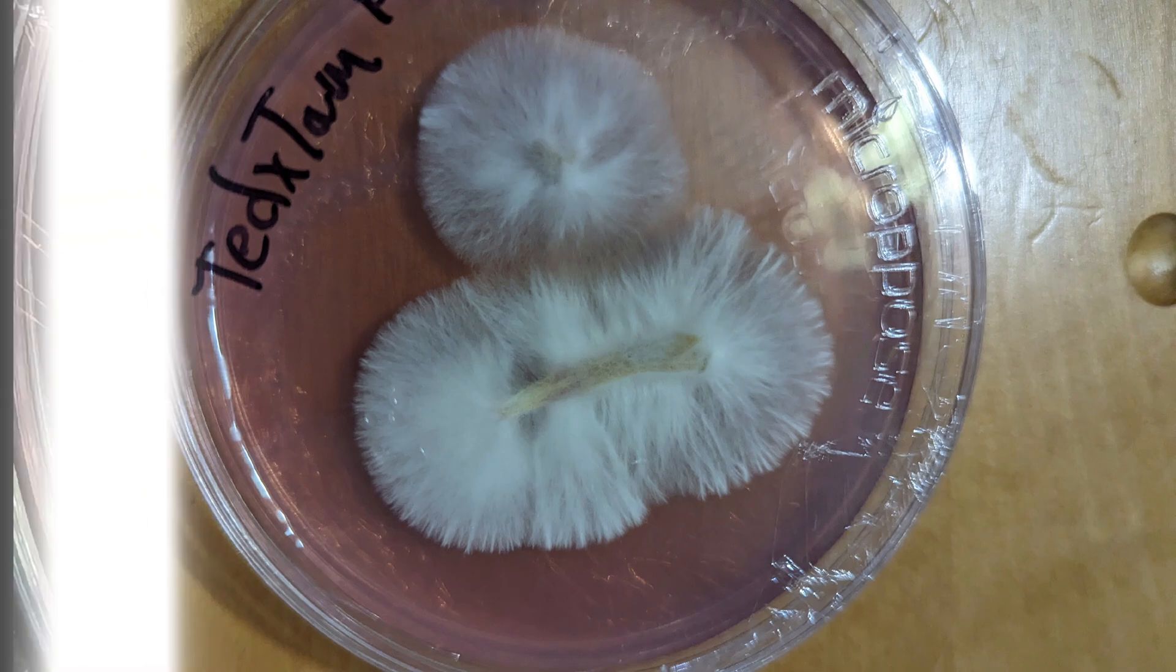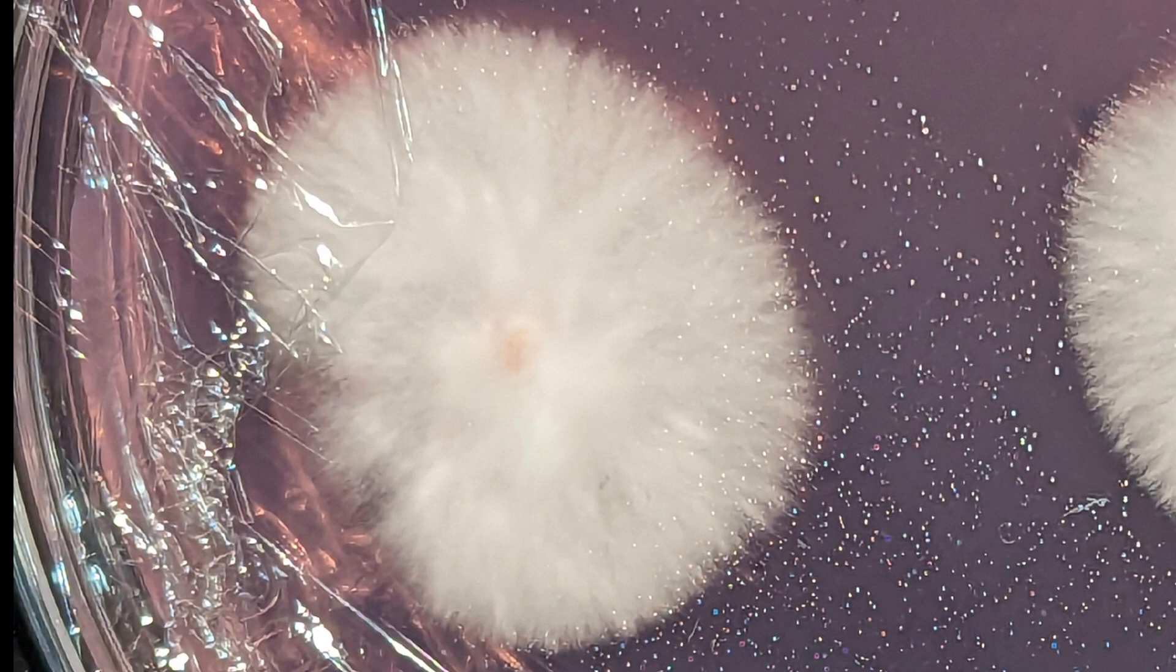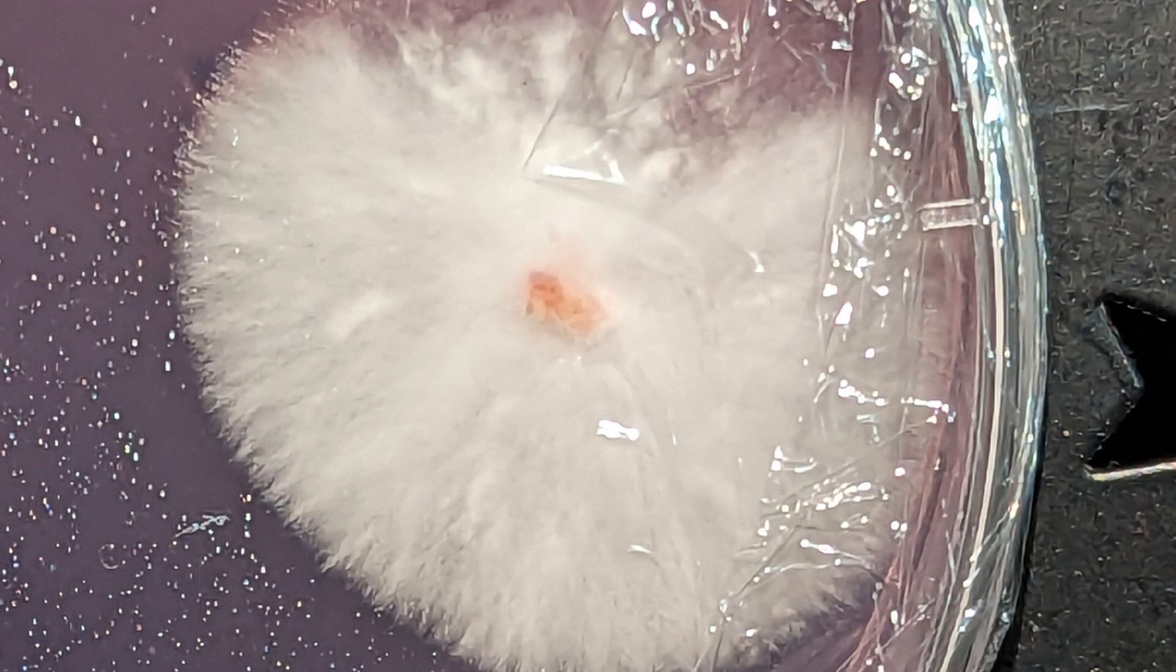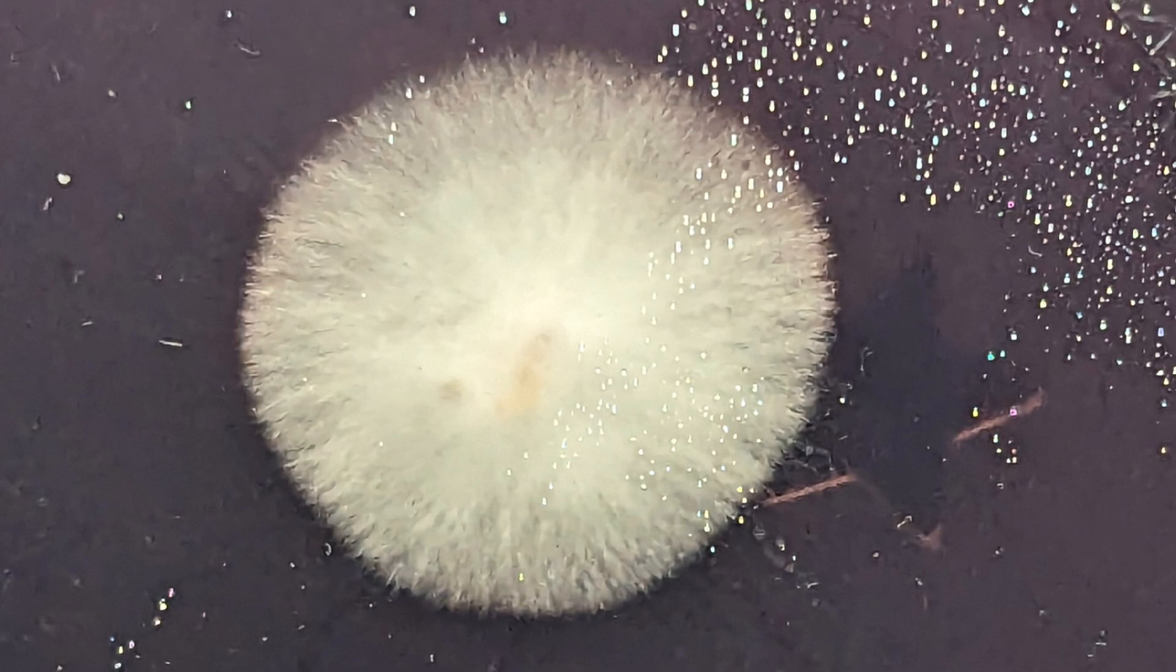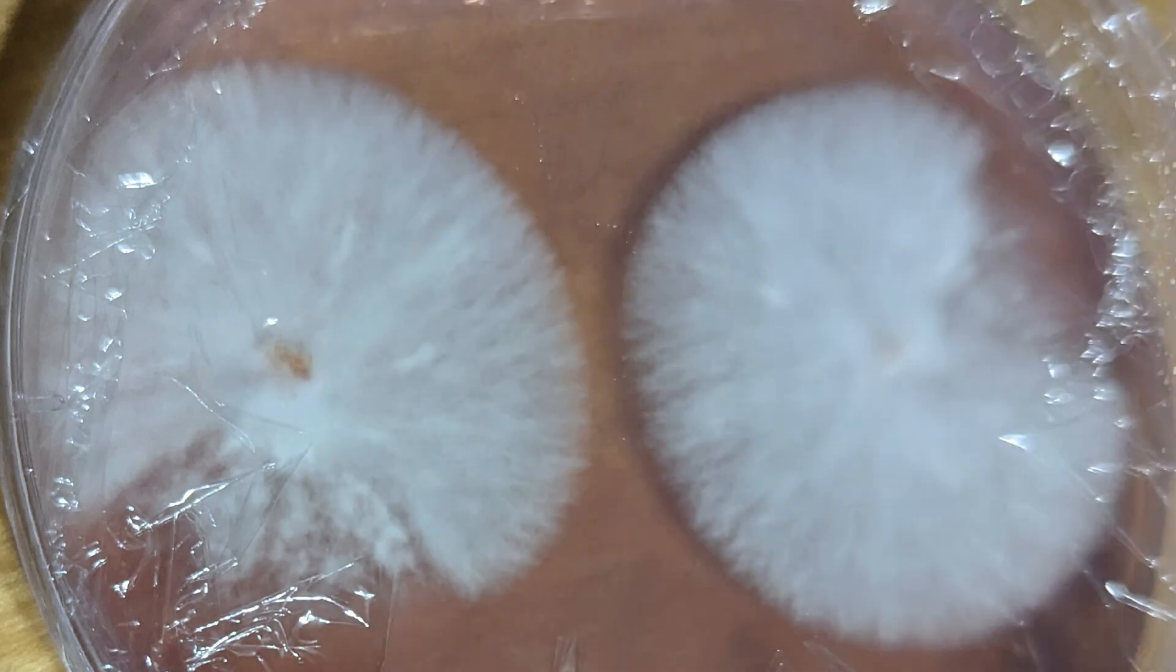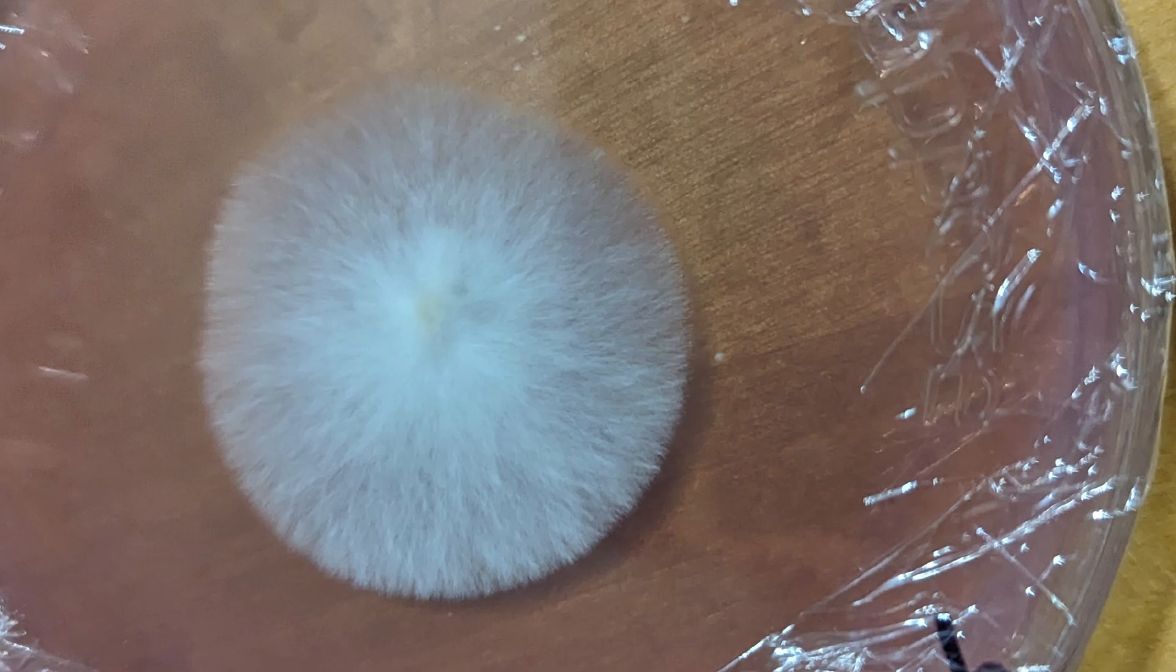These next pictures are the clones from a squat and from the blob in the same tub, and they appear to be clean too, so it seems like it's successful. I won't know for sure until I get them back on grain and then refruit them, so I'll try and keep you guys updated and possibly make some videos about that.